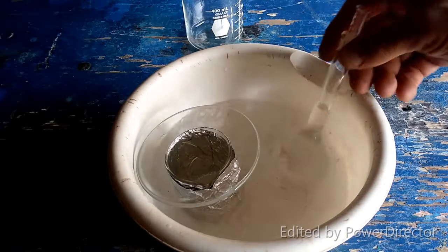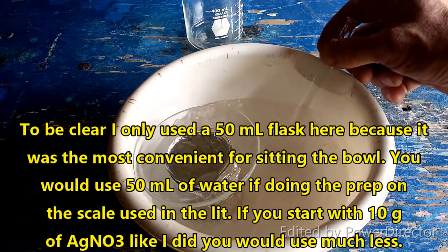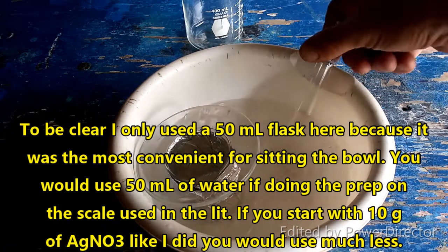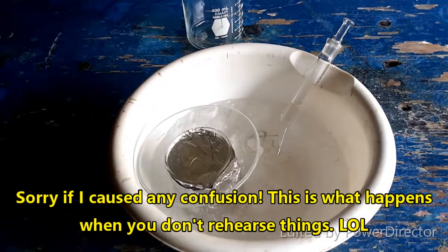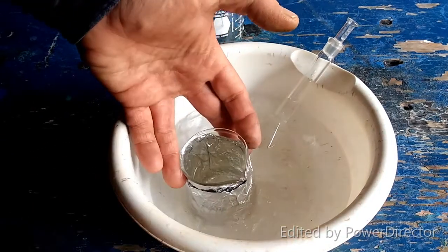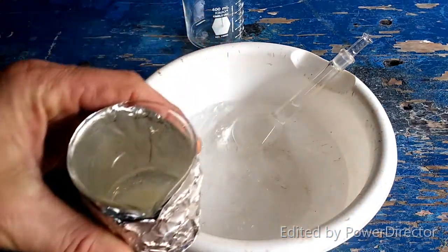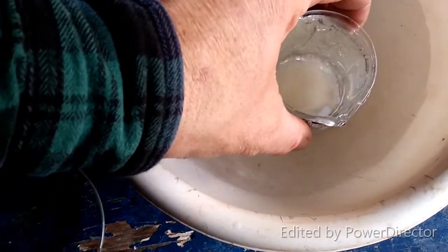We have now reached the point where we have to expose this to light - we don't really have a choice. We will try to keep it as minimal as possible, but some things just can't be avoided. According to the protocol we need to chill 50 milliliters of water down to ice cold. I just used a volumetric flask because it was very convenient. We have our product in here - you can see it formed some really beautiful crystals.